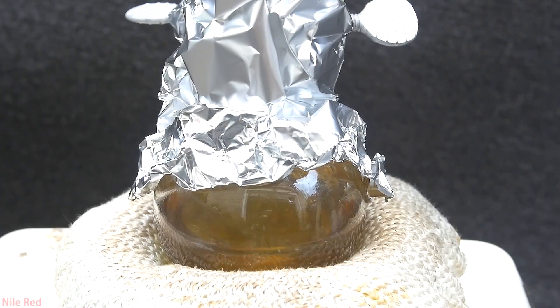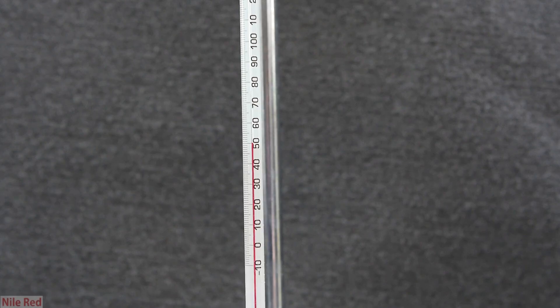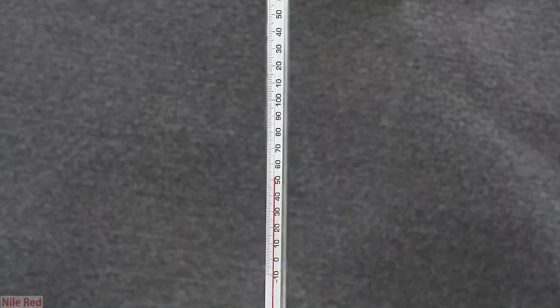When we're ready, we place the heating mantle under the flask, we start our stirring, and we heat things up. As we heat things up, we'll start to collect the acrolein at around 50-51°C. The temperature slowly rose a couple of degrees, and we collected the bulk of the acrolein at around 52-53°C.